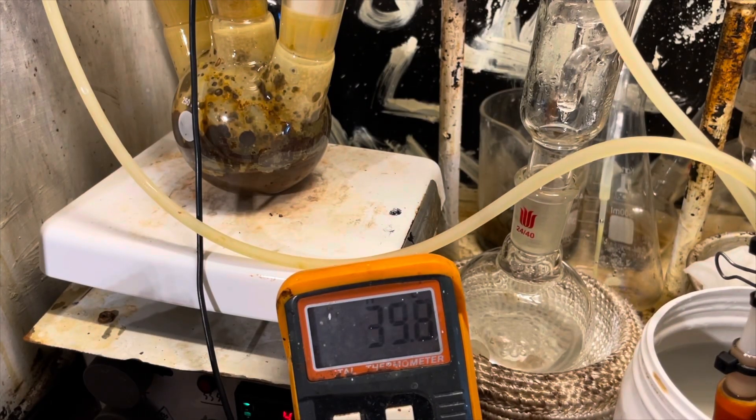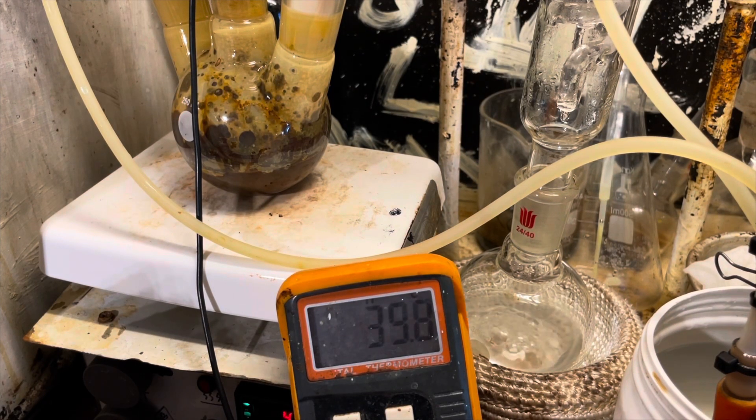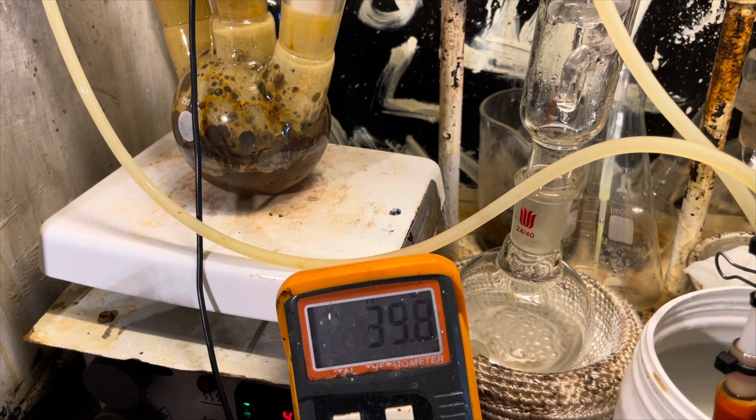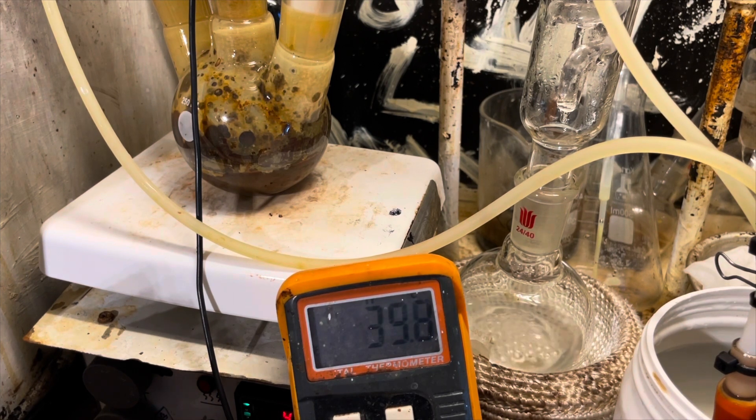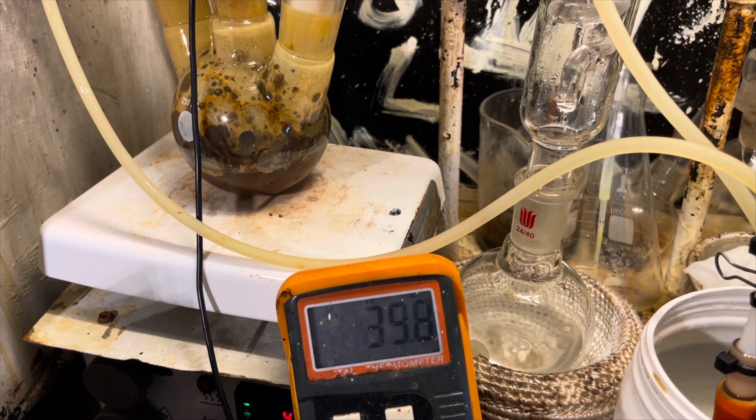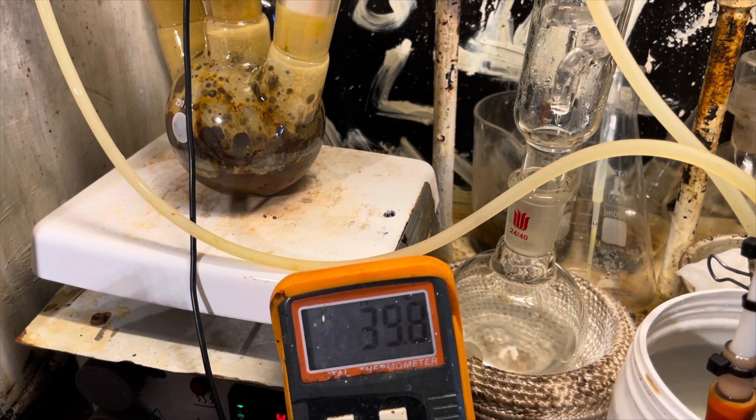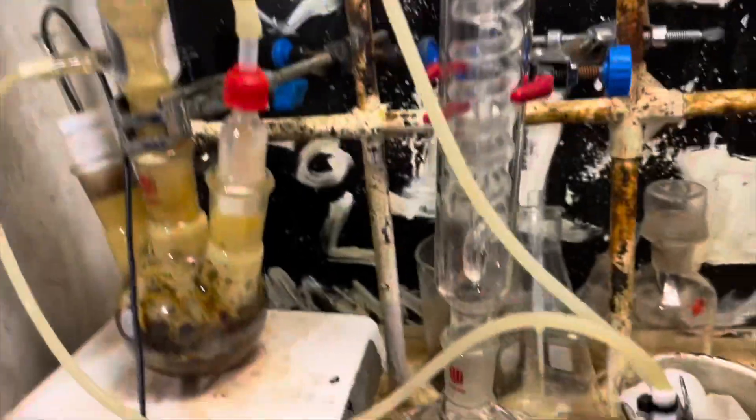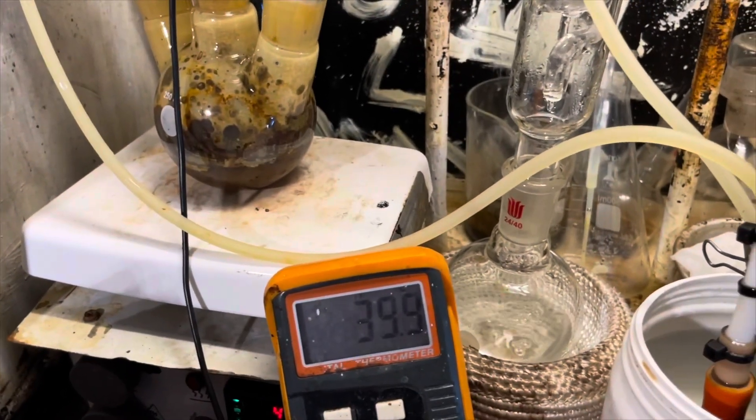But you can see we got this tar-colored substance in the end, and it smelled absolutely horrible. It smelled like ammonium sulfide. And not like sulfur sulfur, but like organosulfur, because sulfur likes to do weird things.